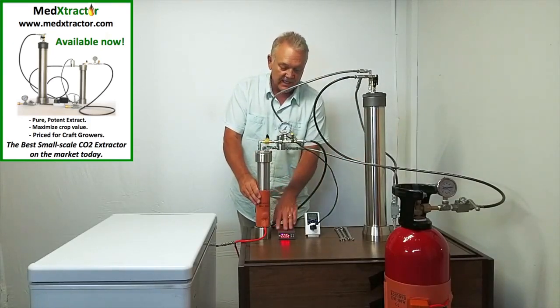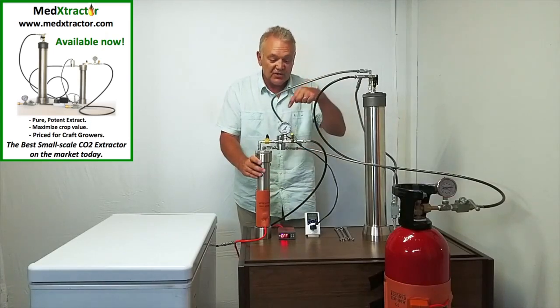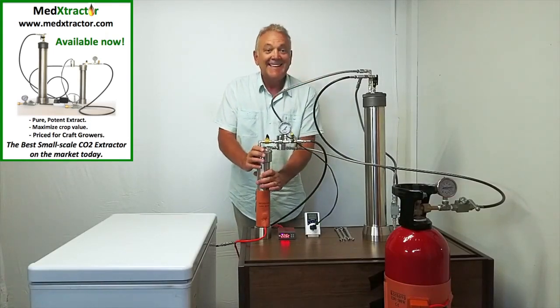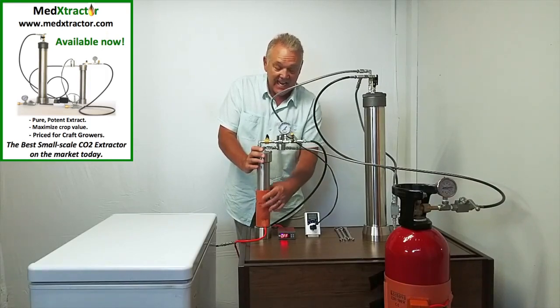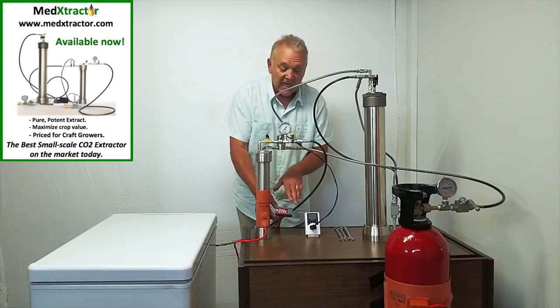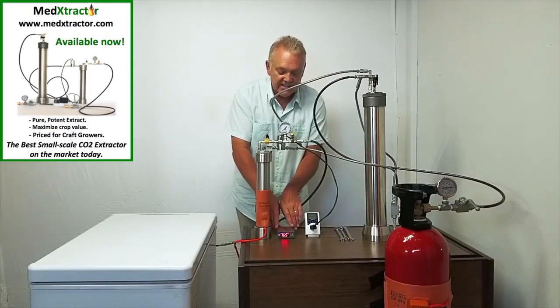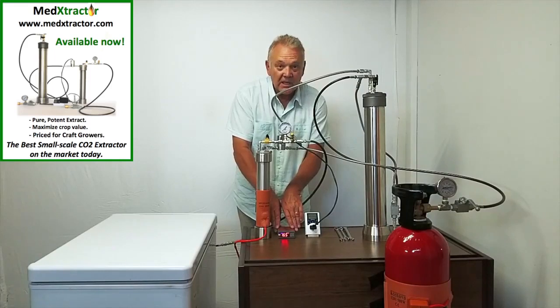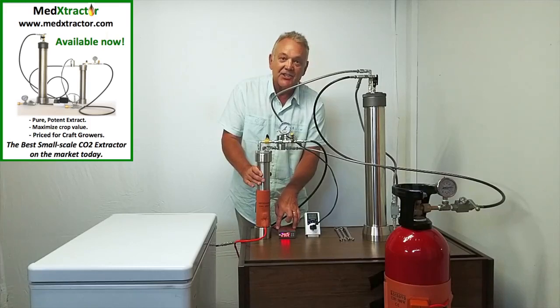This collector is equipped with a digitally controlled heater. When CO2 flows through into here, it decompresses very rapidly and that requires a large amount of heat transfer. The heat lost by the decompression needs to be added back to keep things from freezing up. These controllers come preset, so all you really need to do is start it. This is going to run the temperature up to about 60 degrees Celsius and pre-warm the collector, and it will automatically shut off at that point.